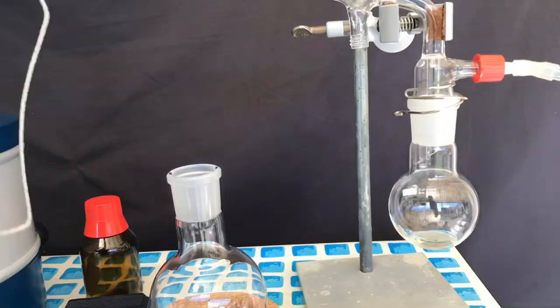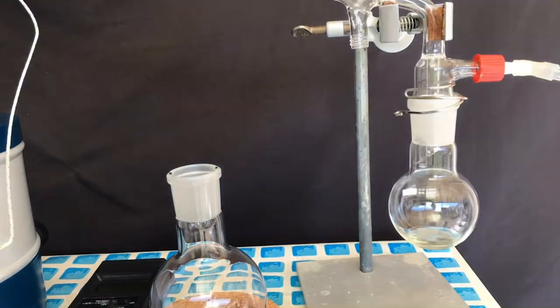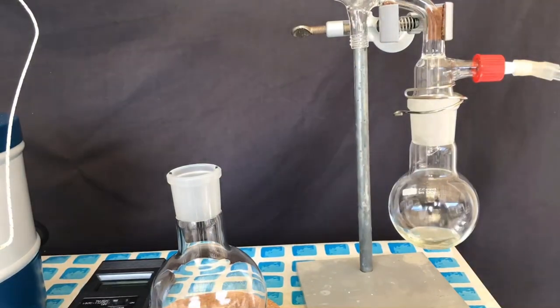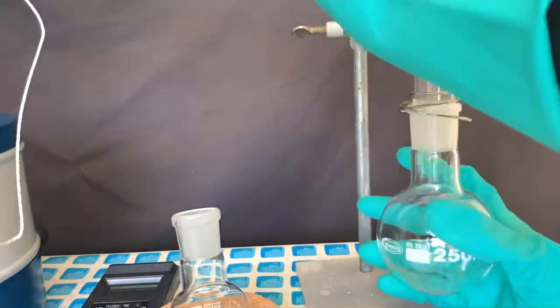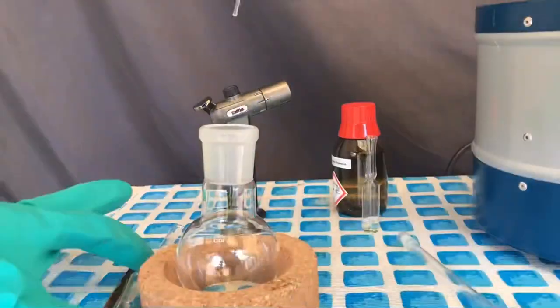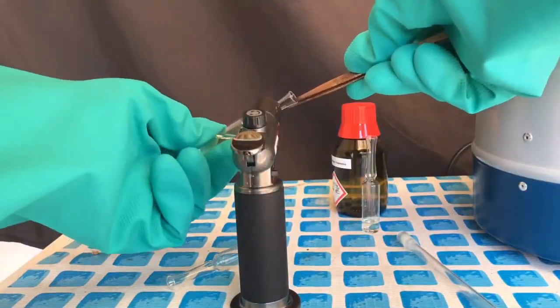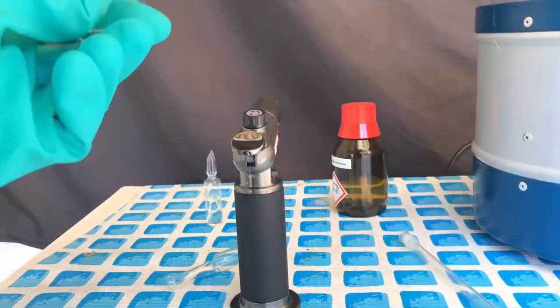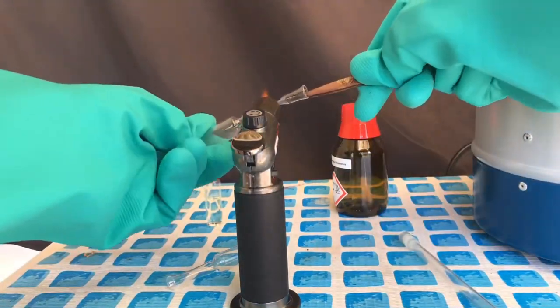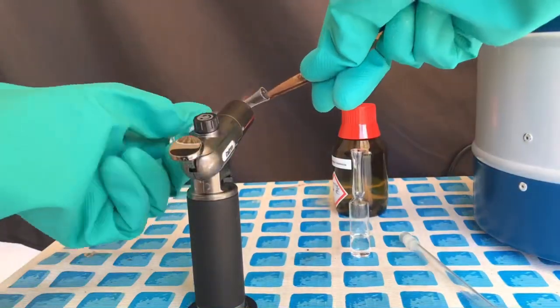Once the thermometer reached 90 degrees C, we switched out the receiving flask. I still wanted to collect whatever comes over because even phosphorus oxychloride mixed with thionyl chloride is still a great chlorinating agent. The product was ampoued, and even the material that came over later was also ampoued.